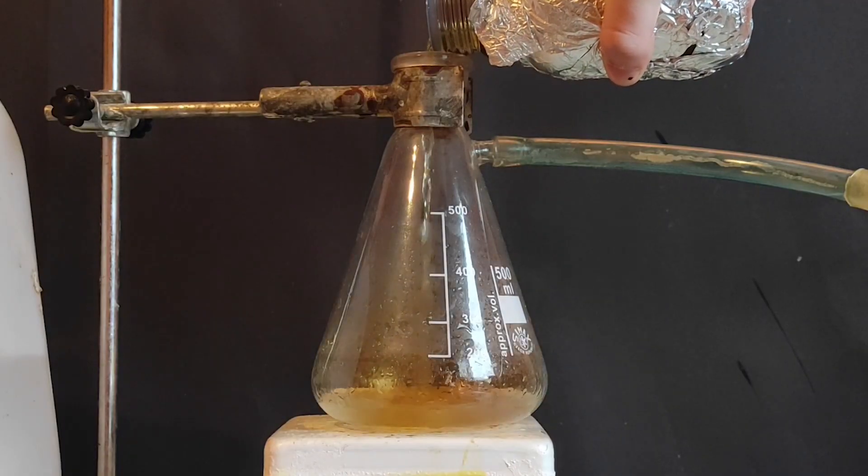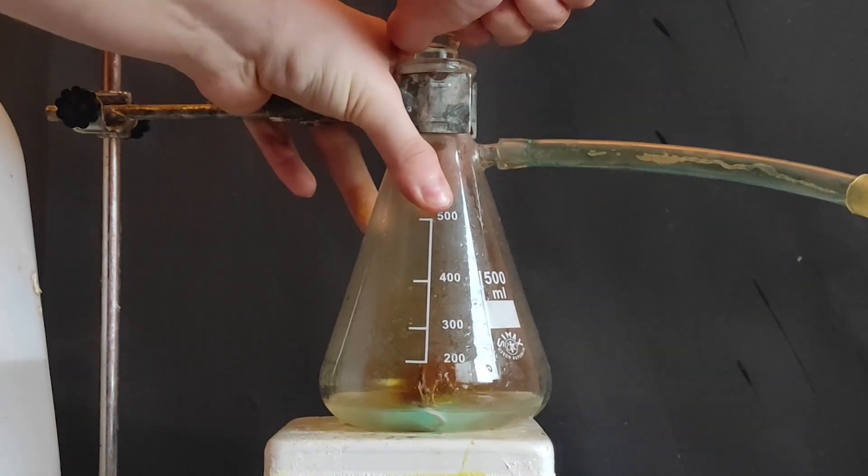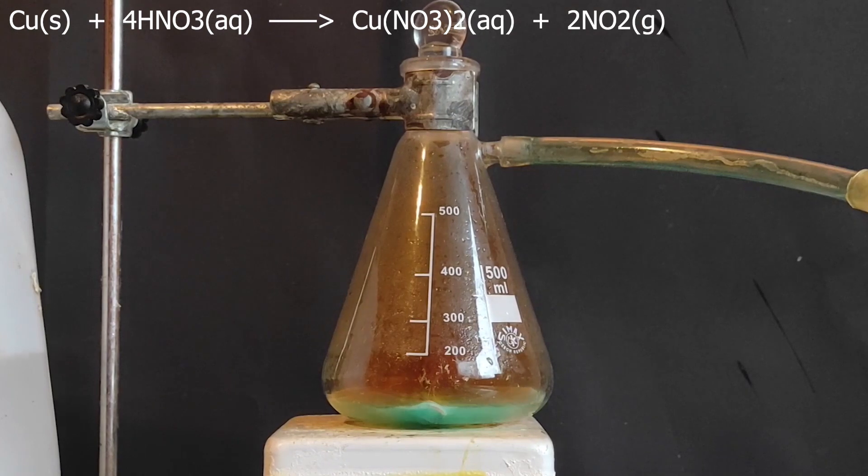And as we all know, 100% nitric acid can't dissolve metals. So when everything was ready I've dropped in the copper metal and stoppered the flask. What's happening here is the nitric acid oxidizes the copper into copper nitrate, which is soluble in water. This reaction produces some nitrogen dioxide, which is a toxic gas and it escapes through the tube to outside.